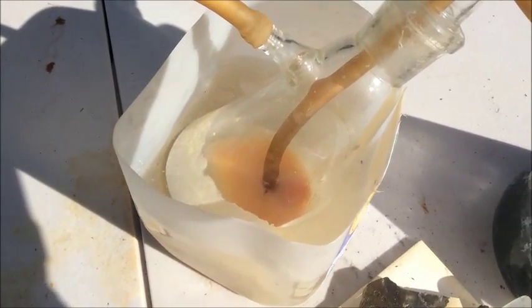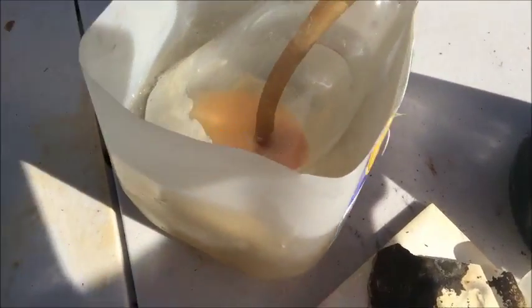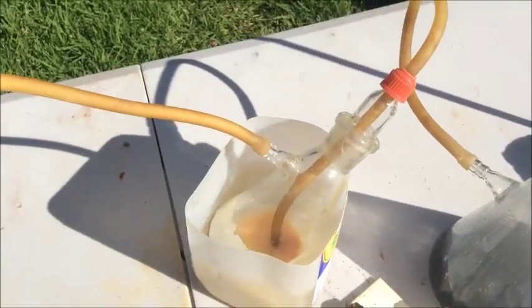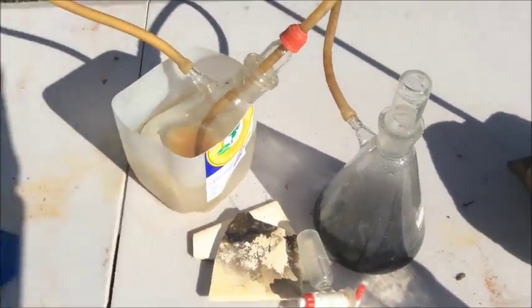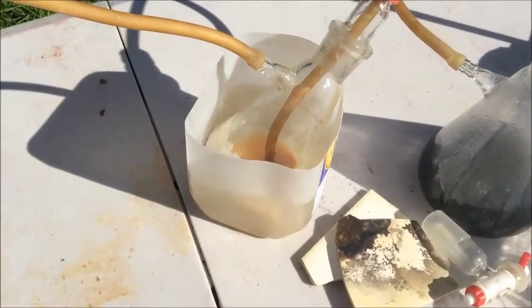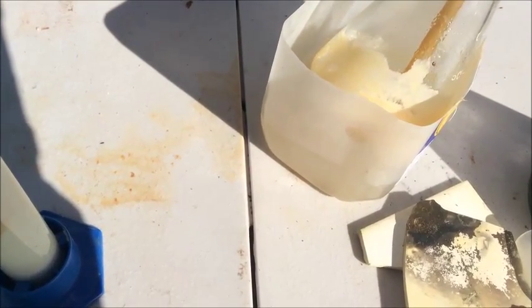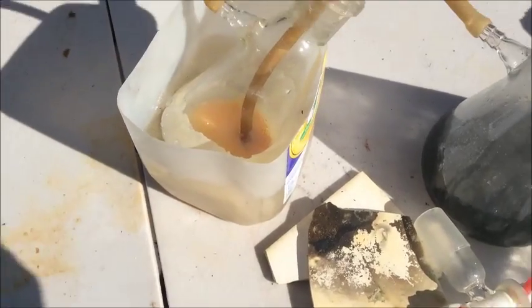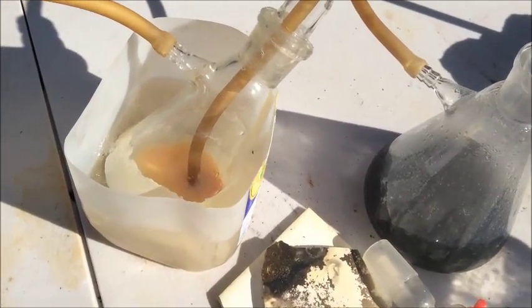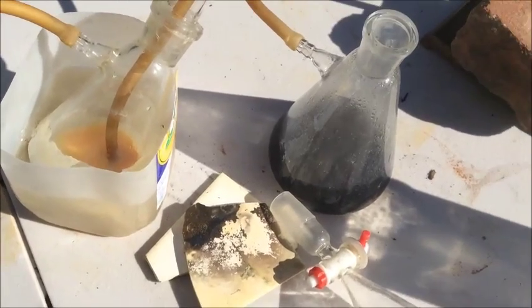About 10 minutes later I've put this in the ice bath and we can see it's absolutely thick with crystals — a big sludgy mass. So sludgy in fact that the hydrogen sulfide isn't pumping through it anymore, which is fine. There's not much coming over now — I can box up the remainder and use it later. I'll add just a tiny bit of water to wash it out. It's gone orange, as you'd expect from polysulfide formation. Even this method can't avoid polysulfide formation.